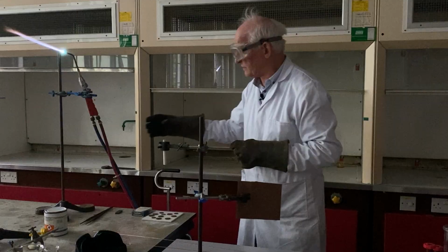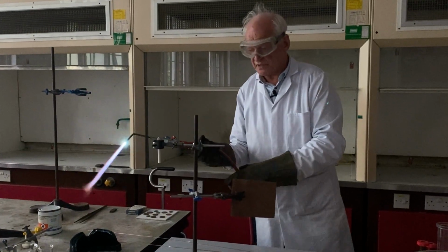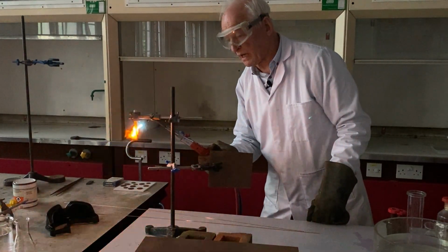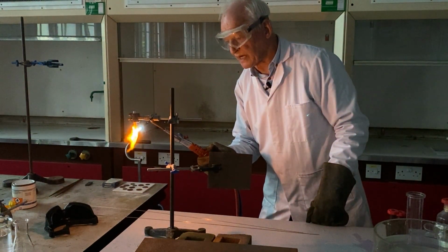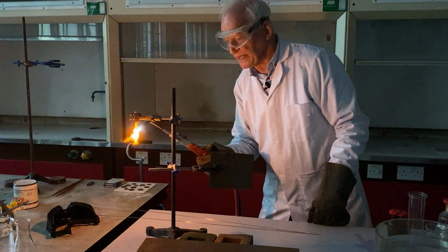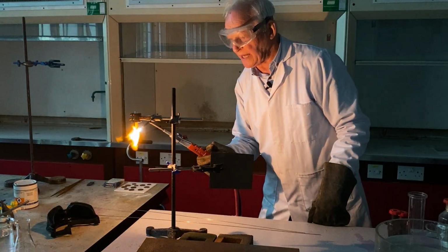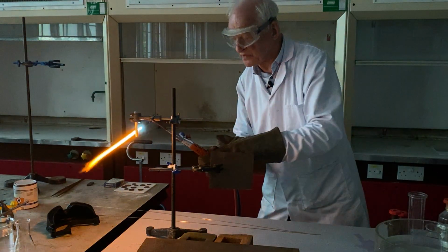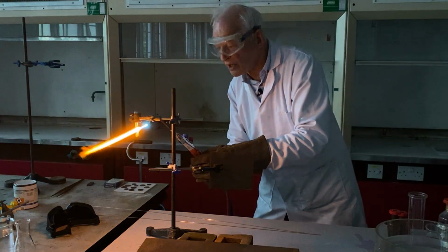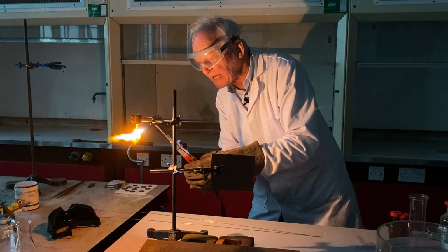And the interesting thing about this is that when it's heated, it will do something very, very unusual. It decomposes to give calcium oxide and carbon dioxide, but the interesting thing is that as it does so, it gives off an extraordinarily bright light. And there you see, I am now in this light, and this is the sort of light that was used in theatre productions. Today we have the well-known expression, in the limelight.